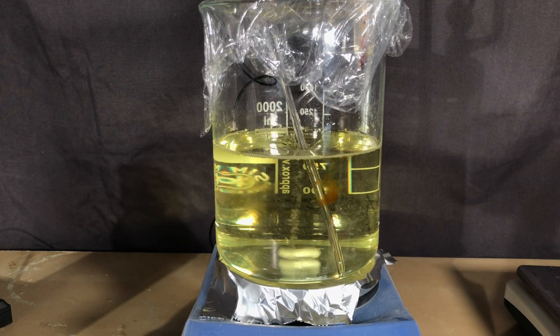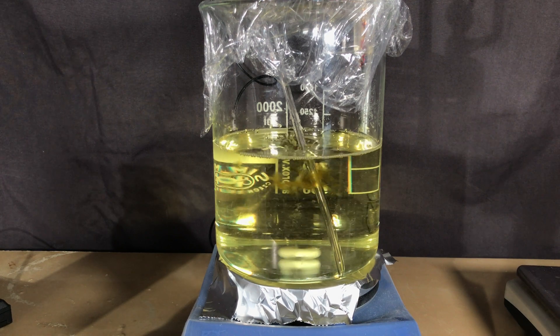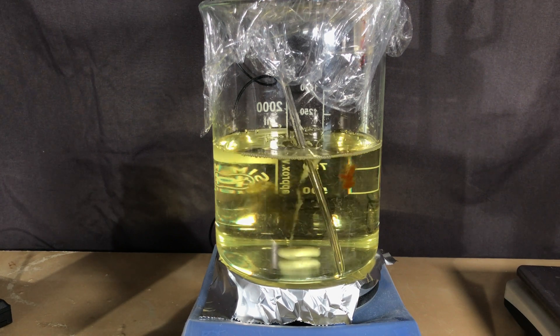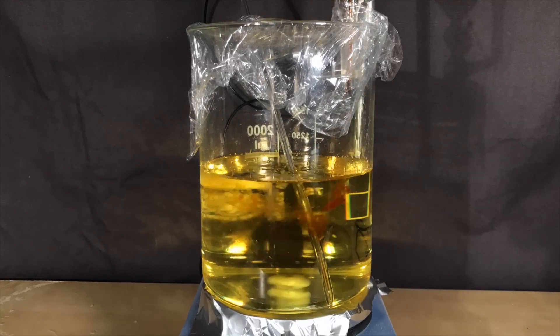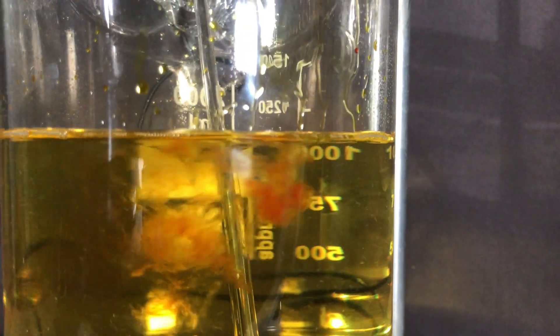You can see that the drops after hitting the vanillin solution quickly dissolve and react and the color of the bromine fades away. I filmed a timelapse in case anything interesting happens but it didn't look like it. It remains mesmerizing to watch the bromine hit the solution.